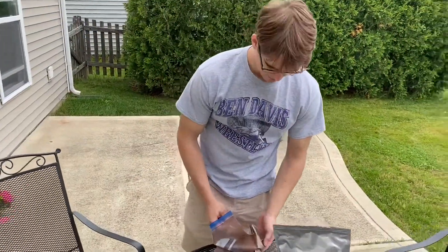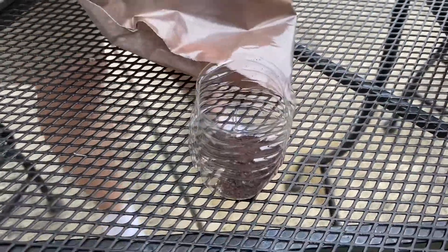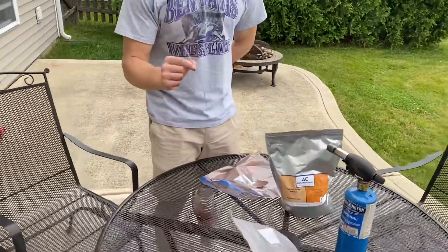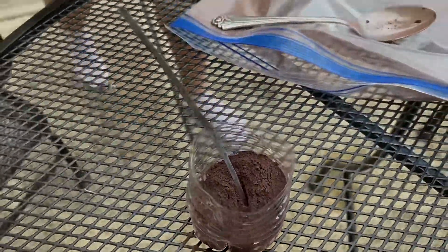Next step, he's gonna scoop out the thermite and put it in this plastic cup, and then we're gonna float that on the top of a graduated cylinder filled with water. Your wick is gonna be a strip of magnesium that he's gonna stick in and that's gonna get it going. All right, a lighter — magnesium strip.